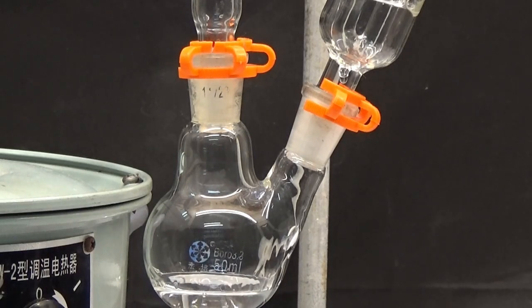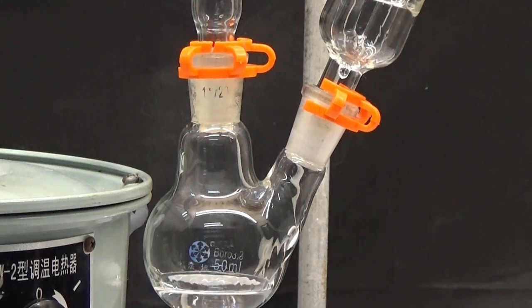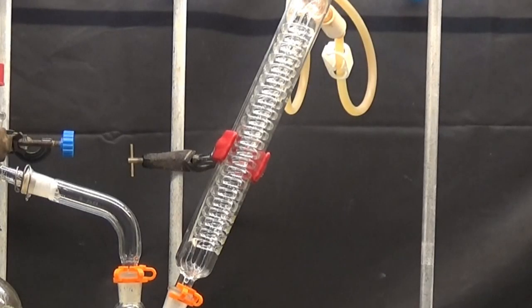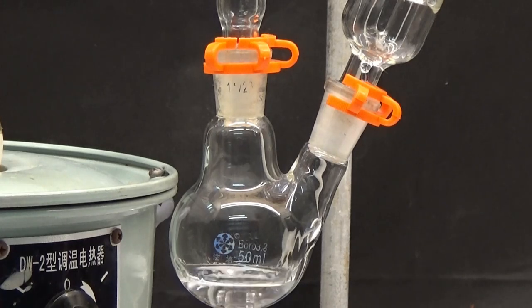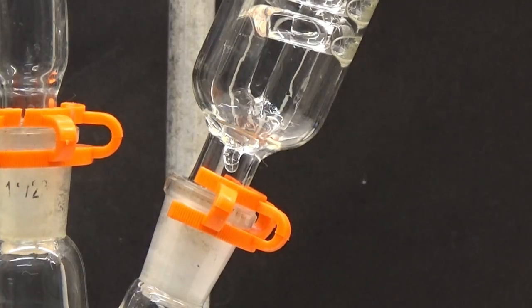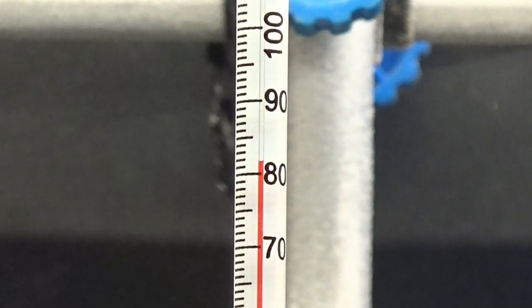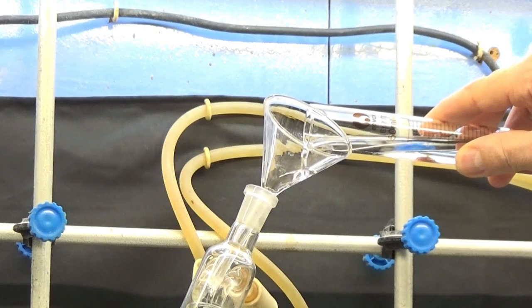My final setup was a trap flask with ethanol and an effective condenser before the vacuum outlet. We let the trap flask fill with the distilled ether and ethanol and when we see that the temperature rises more than 80 degrees we adjust the ethanol level in the trap flask and connect the vacuum.